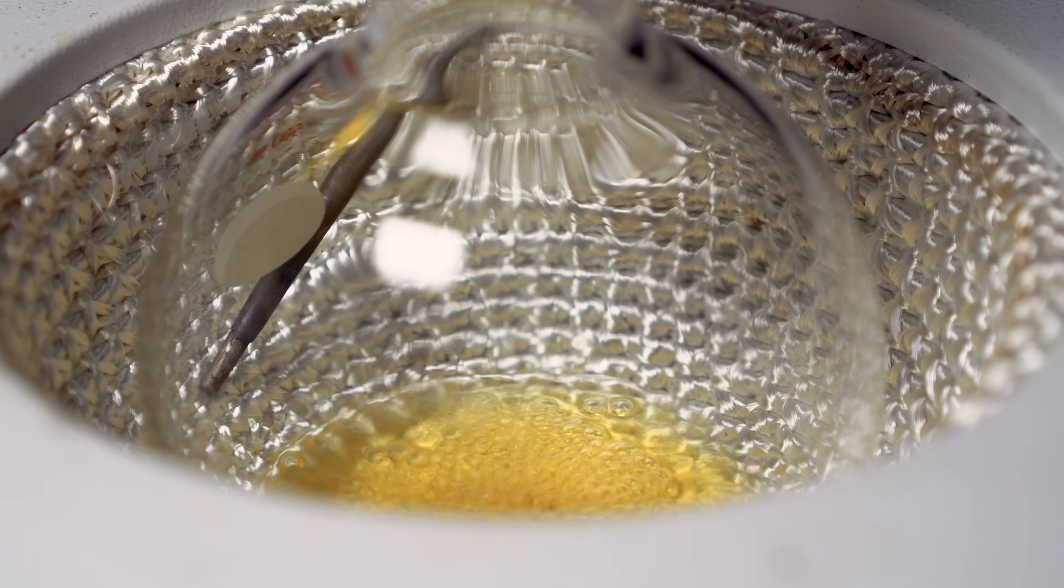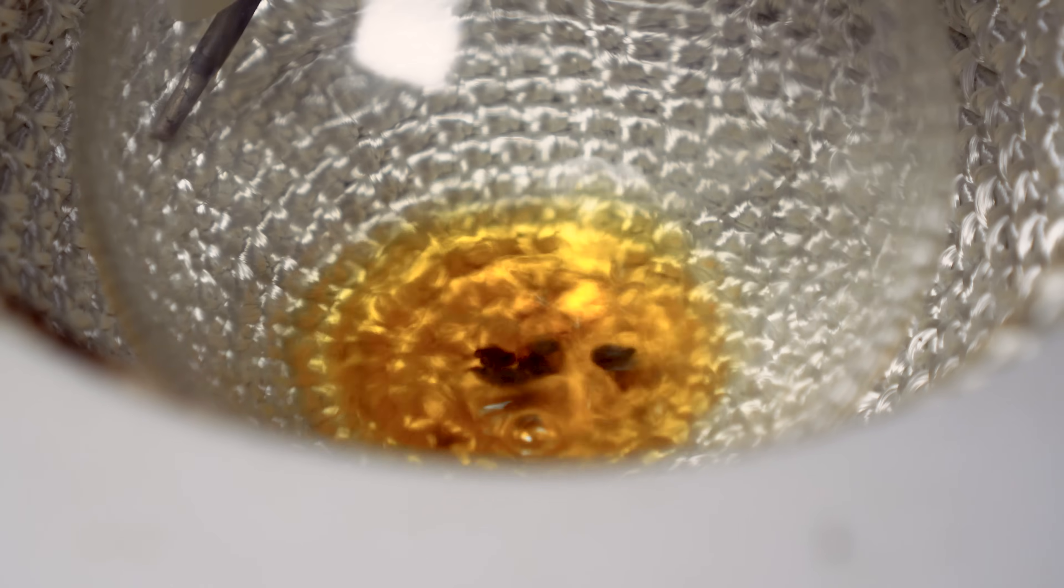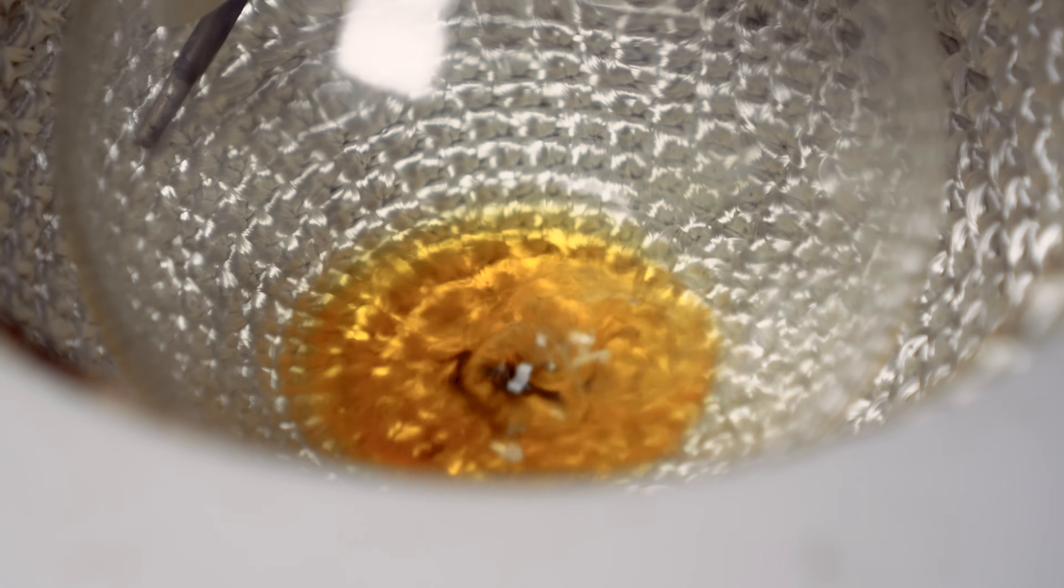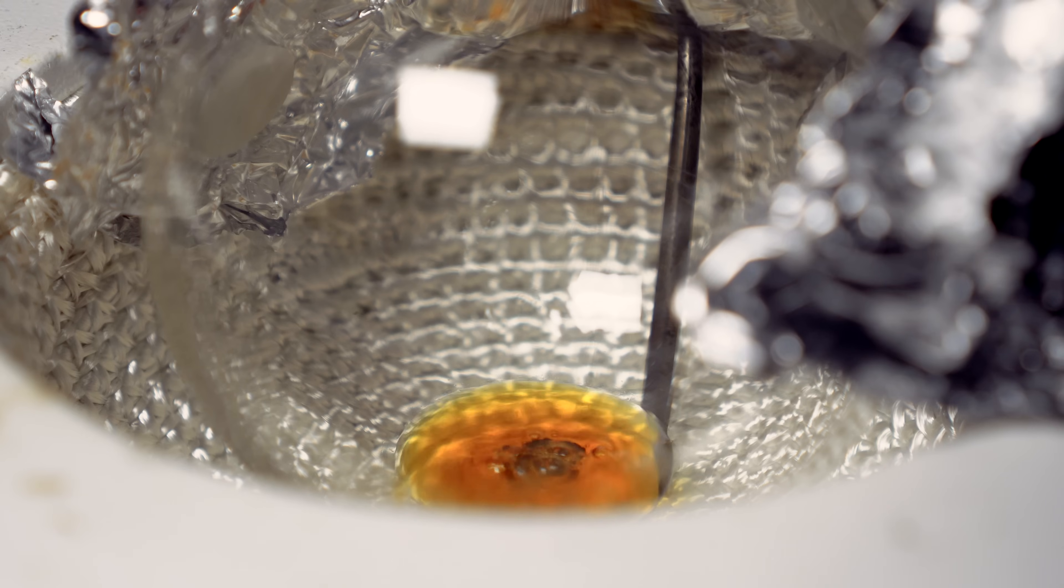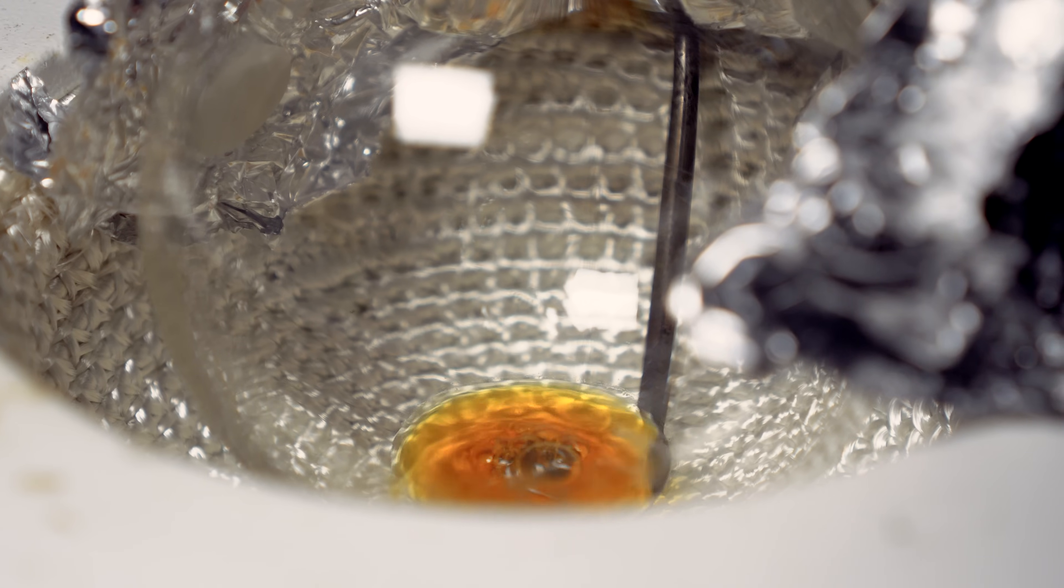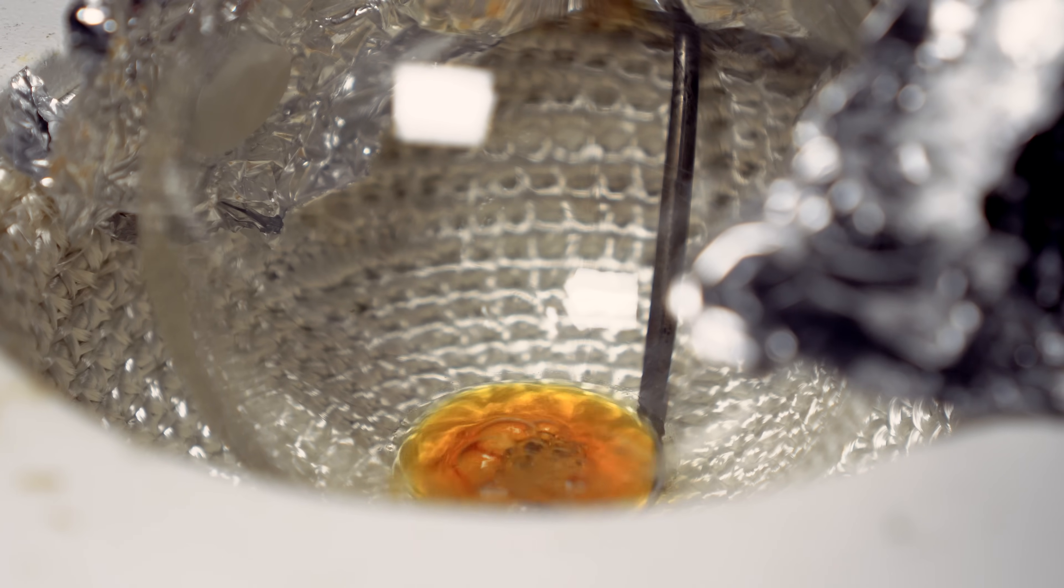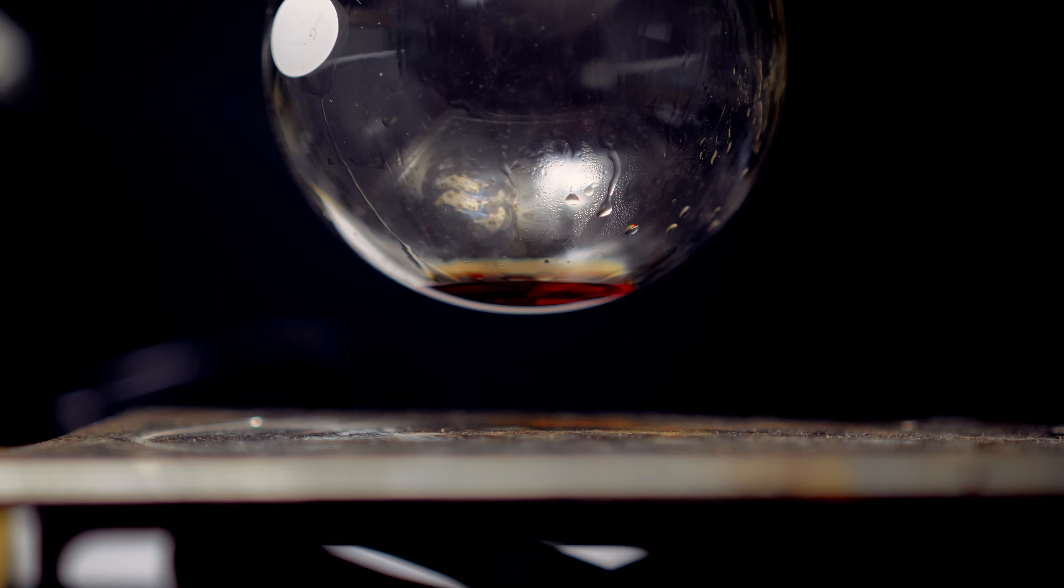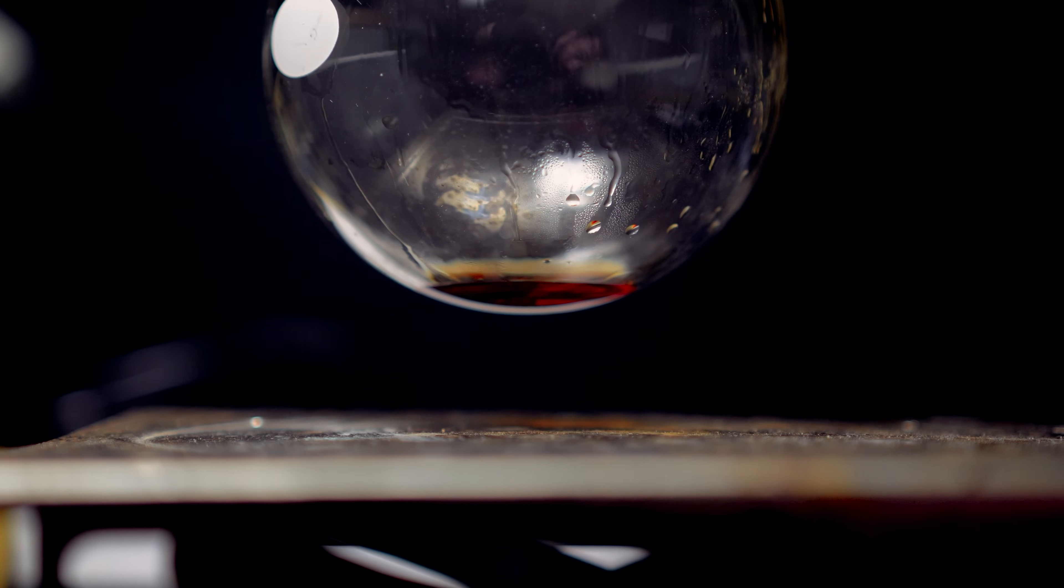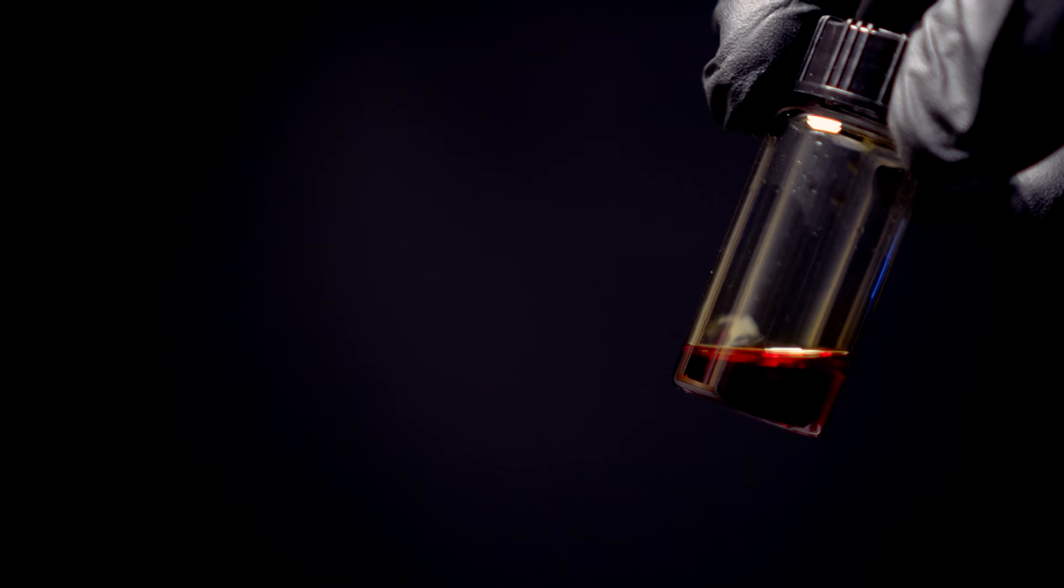However near the end I was having some issues and I decided to pull a vacuum just to get everything out. I think it may have been too hot in the heating mantle and potentially air sensitive. As it got lower and lower the oil turned into this orangish color and eventually it turned this orange-red. I was definitely very annoyed as I know doing a simple distillation was kind of a gamble. It was also quite opaque and it just didn't look right. I really need to buy a better vacuum or get a rotary vap.